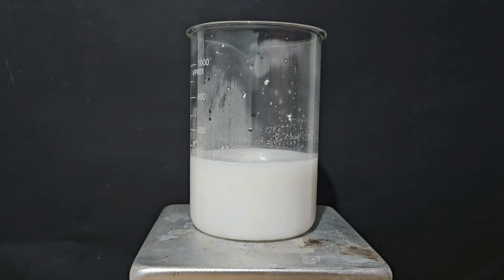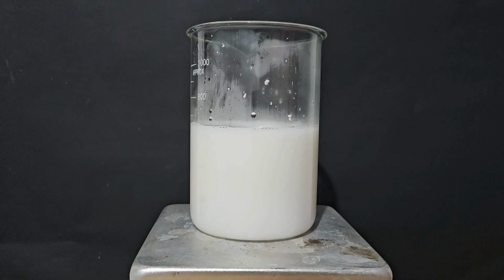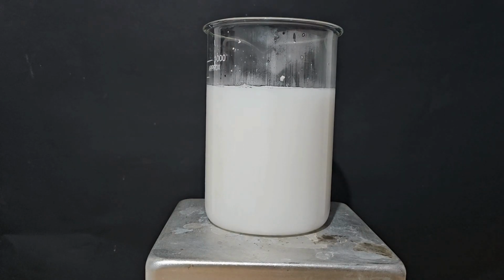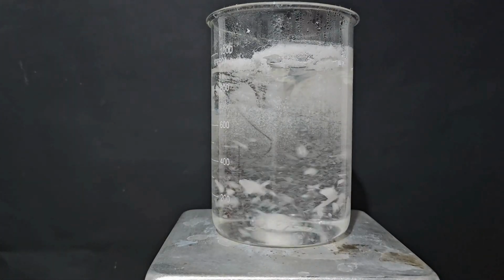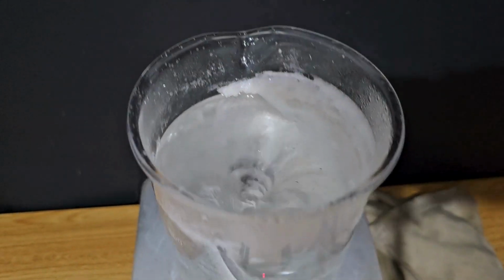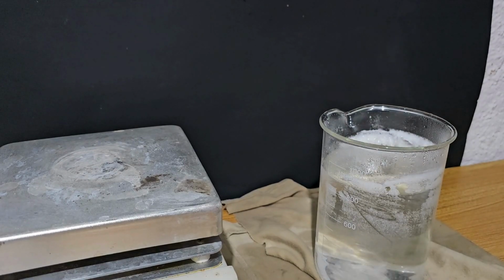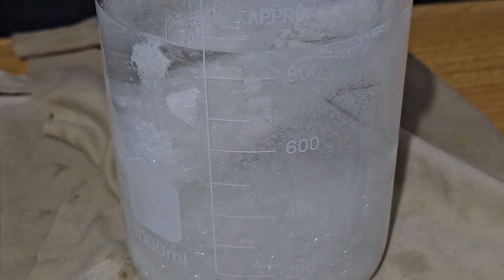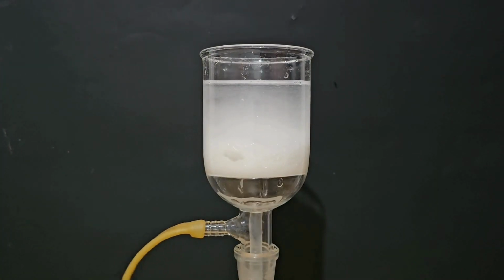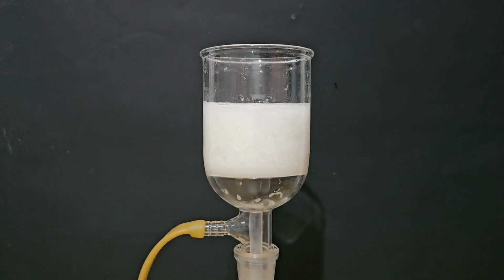I started adding distilled water to perform the recrystallization, but salicylic acid never fully dissolved, even when I added more water and more water and more water. It only formed like a crust on the upper part, and those crystals fell back into the solution, so I surrendered and removed the beaker from the hot plate. Crystals of salicylic acid started forming immediately. I placed the beaker inside the fridge for something like 2 hours, and then I began to filter them under vacuum.